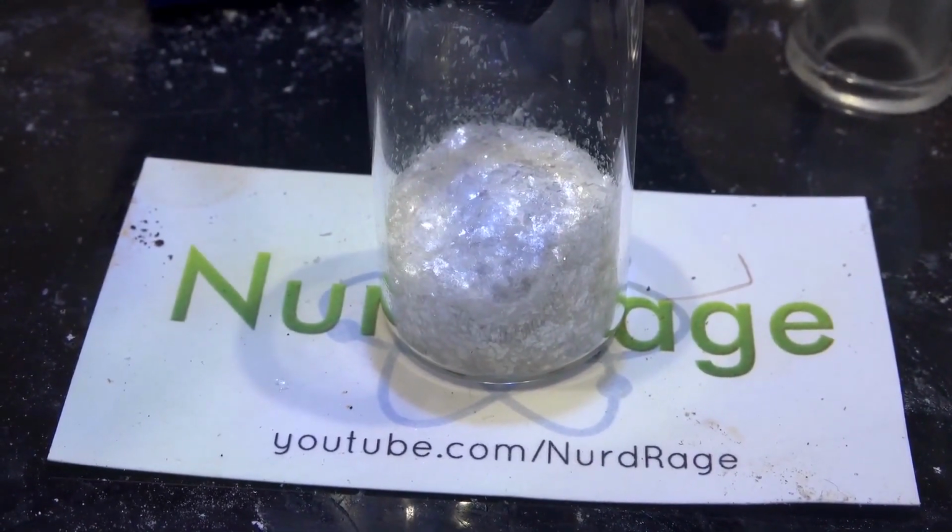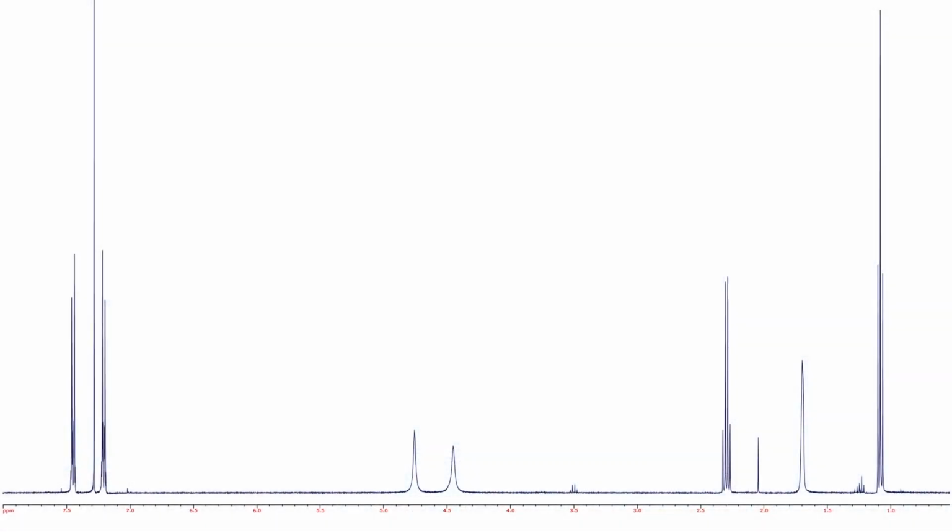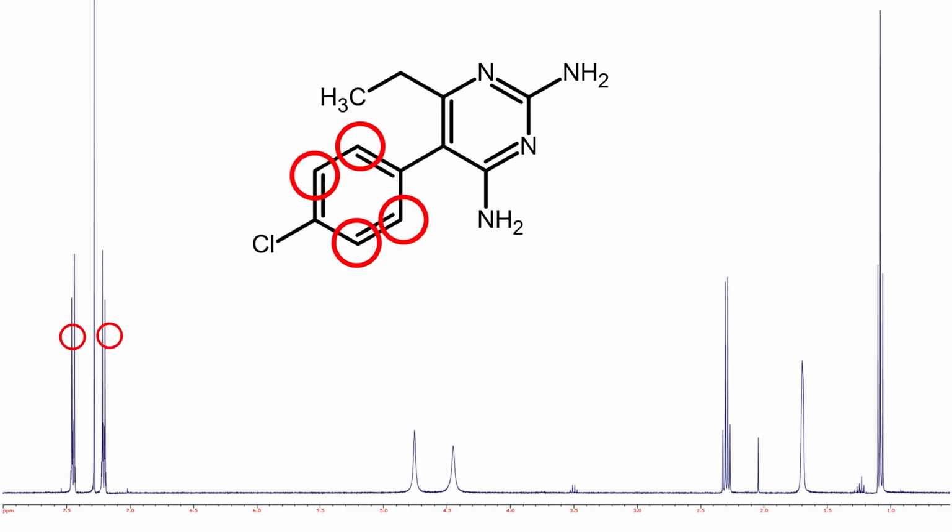I sent off a sample for NMR spectroscopy analysis and got back this spectrum. These peaks here are the aromatic protons, and this peak here is the chloroform D solvent peak. This peak here is the amine on the guanidine structural element. This peak here is the amine on the hydrocarbon backbone. This peak here is the CH2 on the ethyl group, and that peak there is the CH3. This broad peak here is water contamination for obvious reasons. These very tiny peaks here and here are diethyl ether.